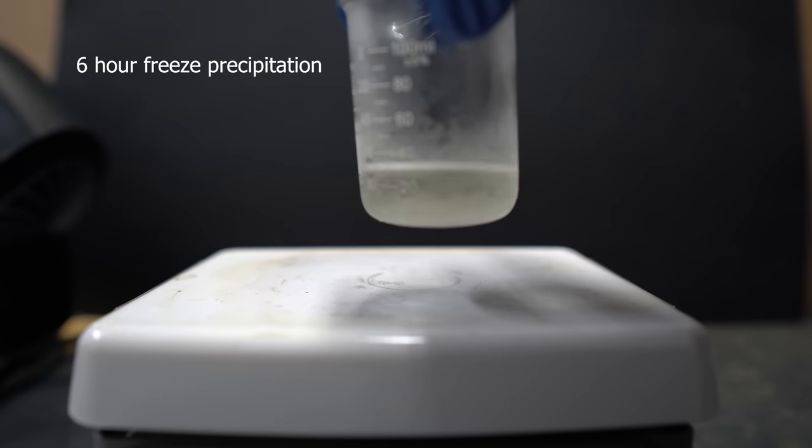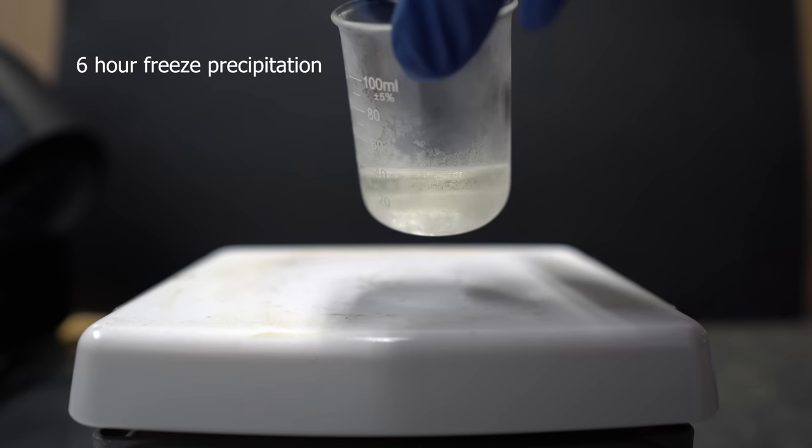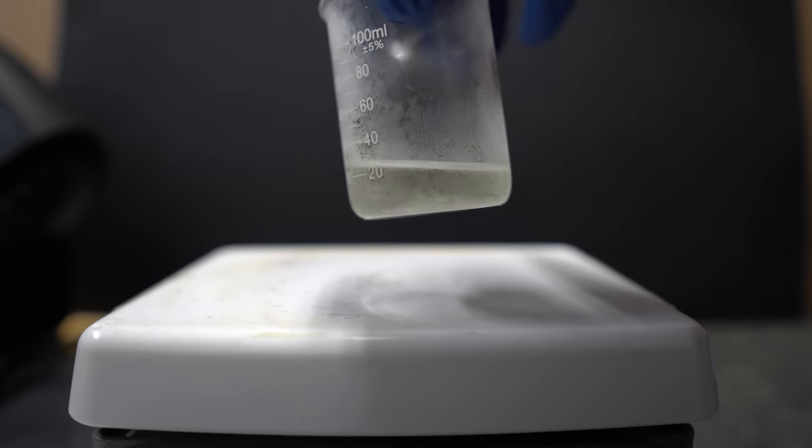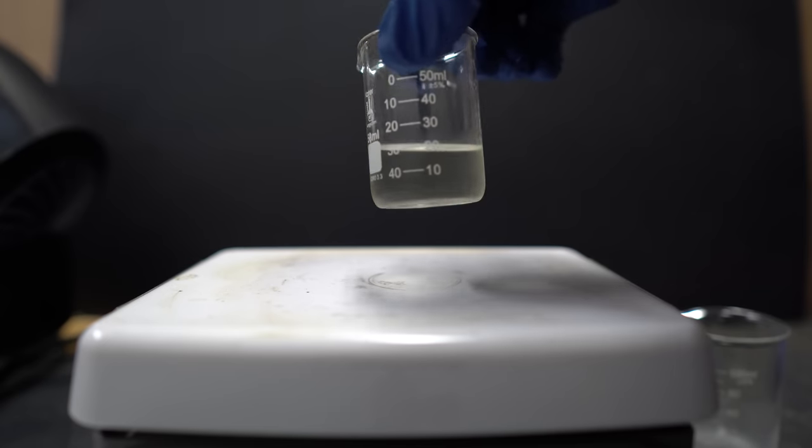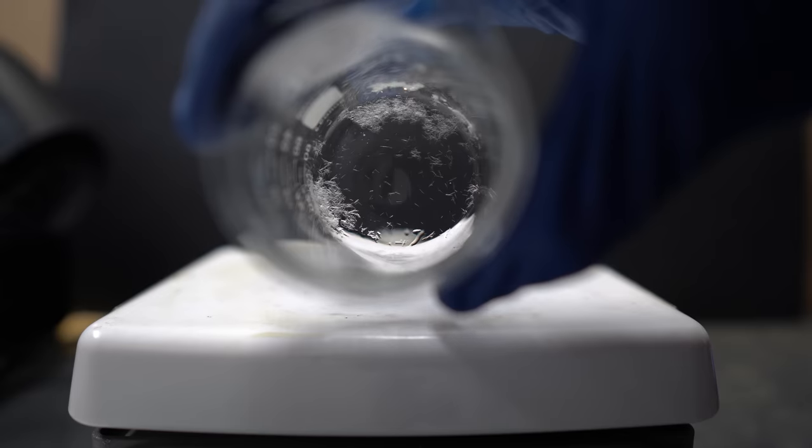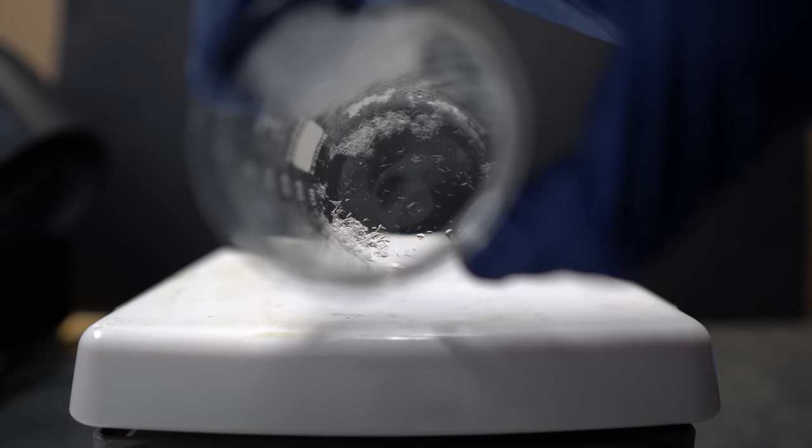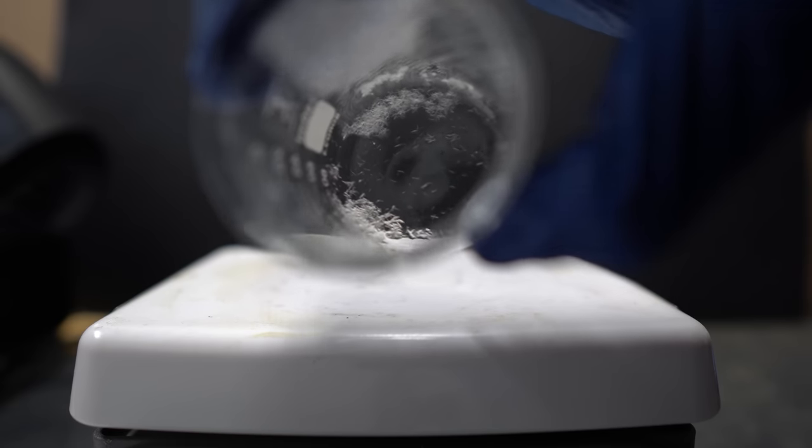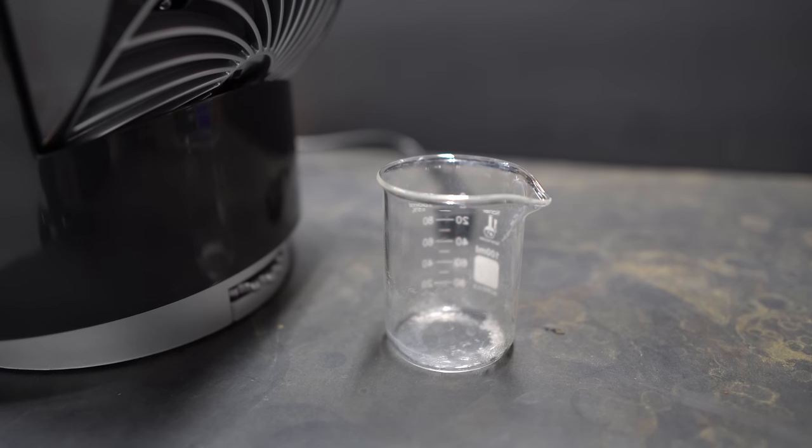I also want to show you why doing the full 12 to 24 hours is extremely important. This is a solution that I left six hours in the freezer. You might see that the crystals were formed and think okay I got all my product, but this really isn't the case. What I decided to do was pour the excess methanol into another container and dry the crystals. This solution will be put back into the freezer for another 18 hours, and this is the amount of crystals that we got after six hours. It's very tempting to want to take it out once you see crystals, but you must leave it in the freezer for at least 12 to 24 hours.